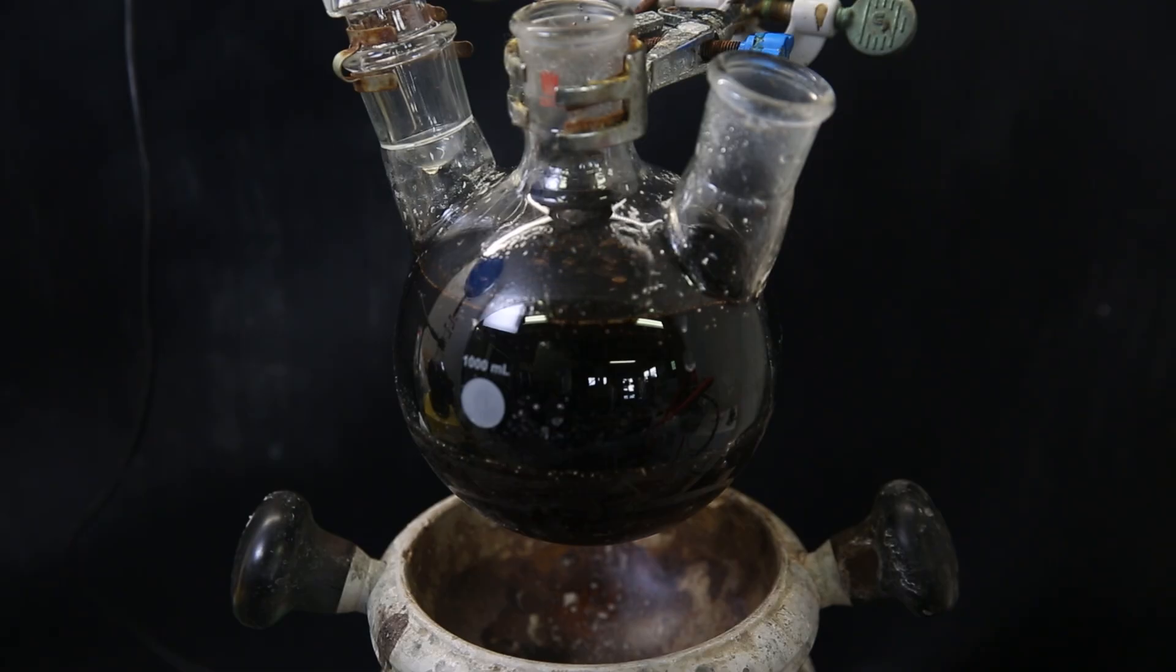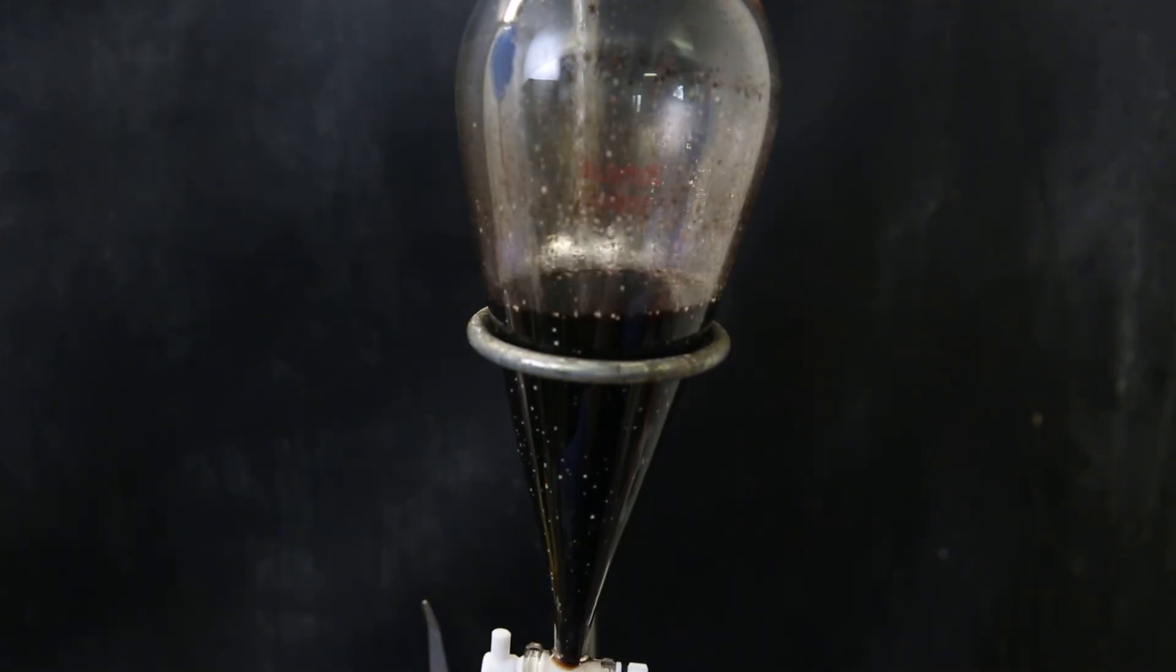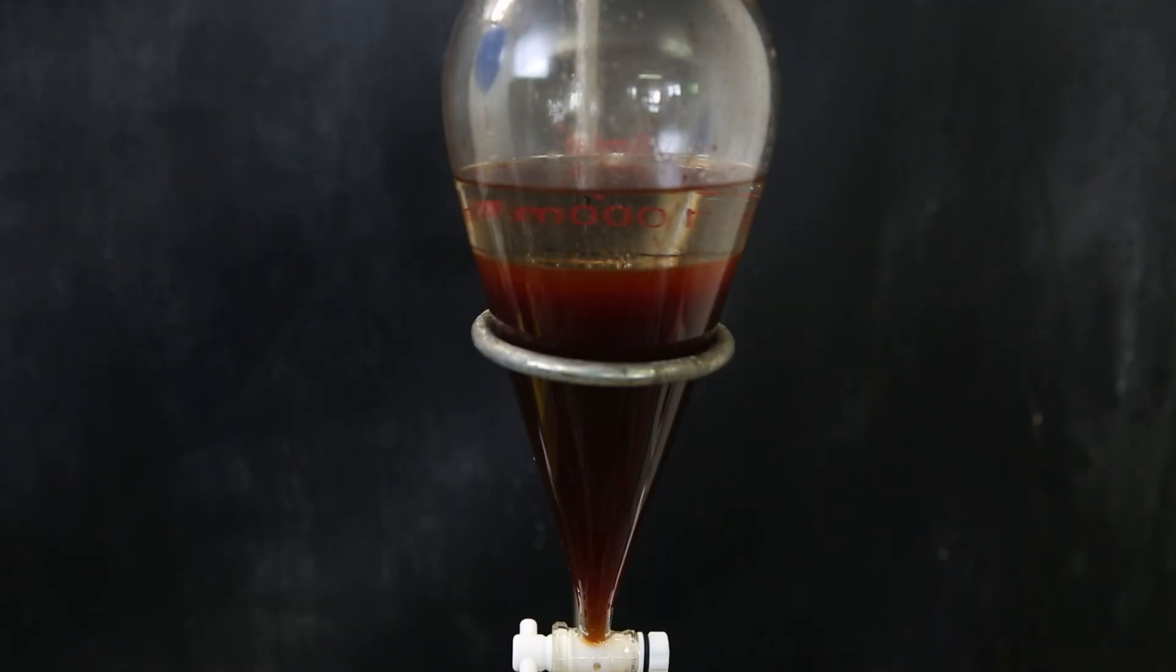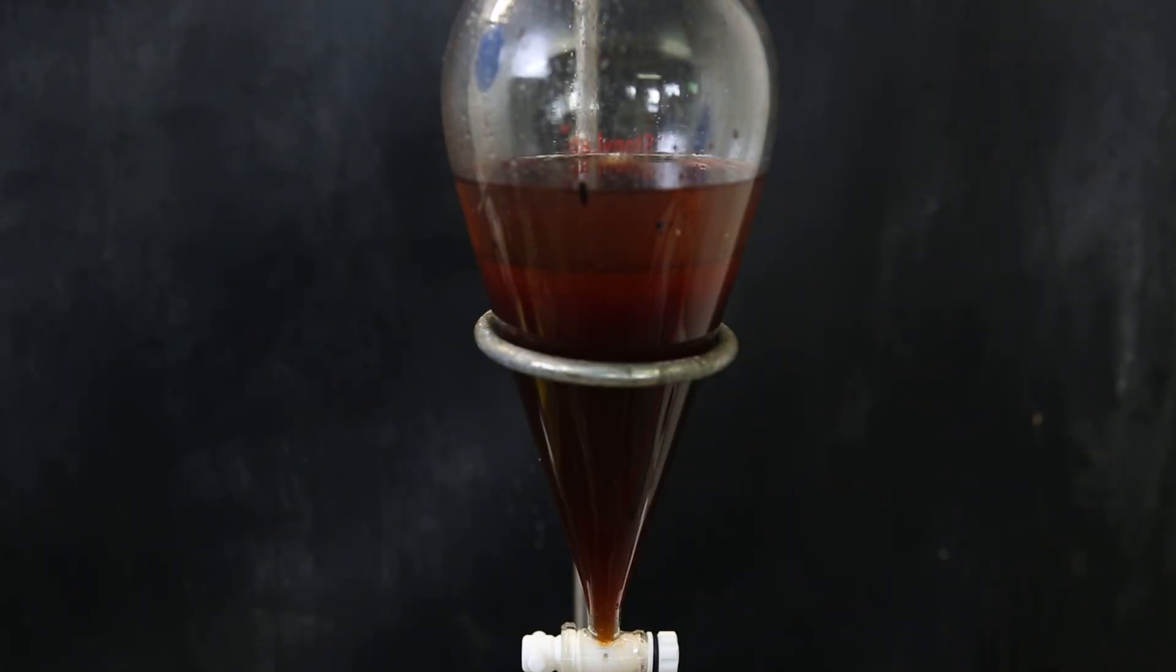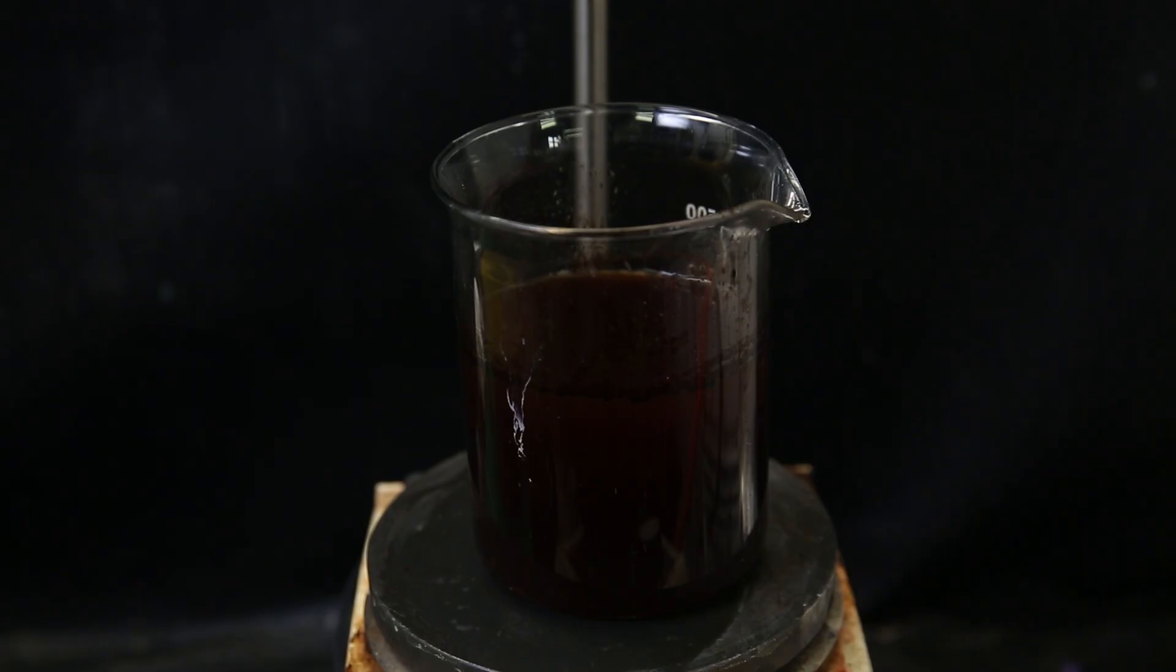The bottom layer contains the water-soluble salt of the product, so I separate the layers, and discard the top toluene layer. I then bring back the water layer, and extract it once with toluene, to get out mostly the side product of biphenyl. Now I have the solution containing the hydrobromide salt of the product.